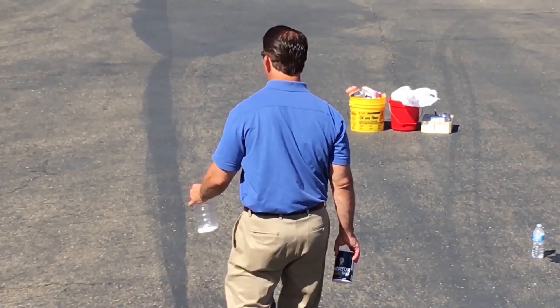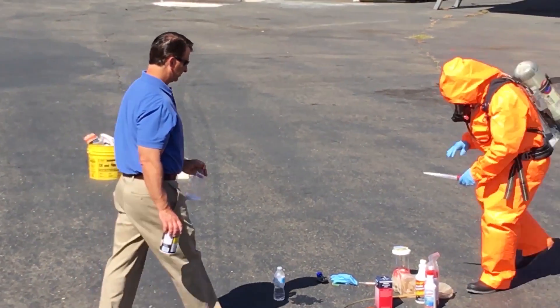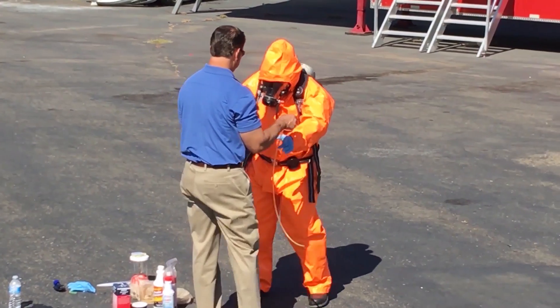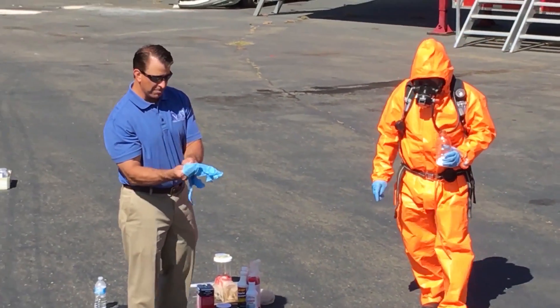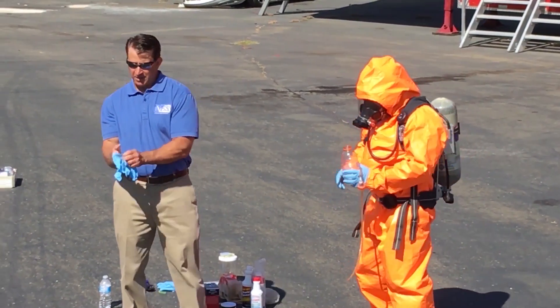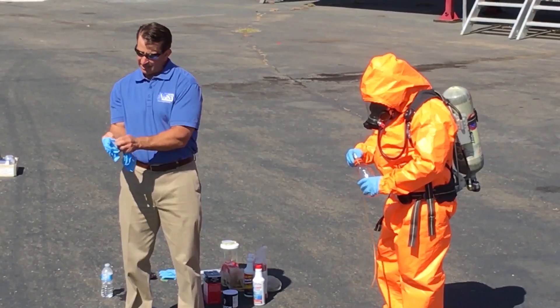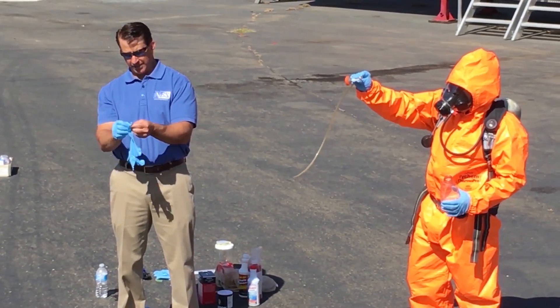We're going to do that while we've got the respirator on. We've got another modified Gatorade bottle with a cap that's been drilled out and tubing placed onto it. When we make the gas, it's going to be channeled down the tubing and into the solution.